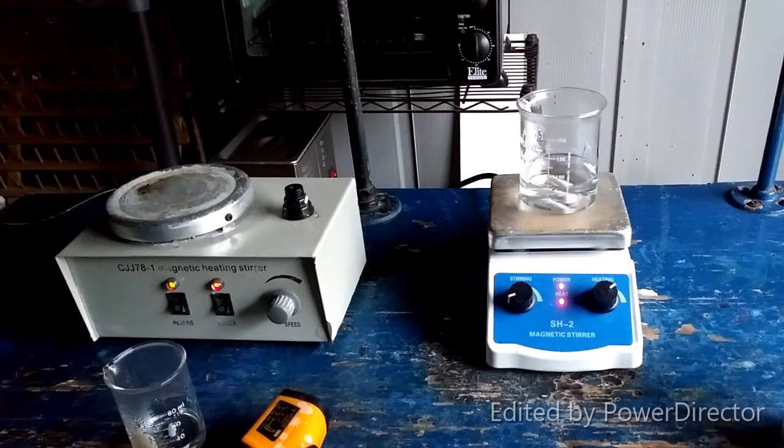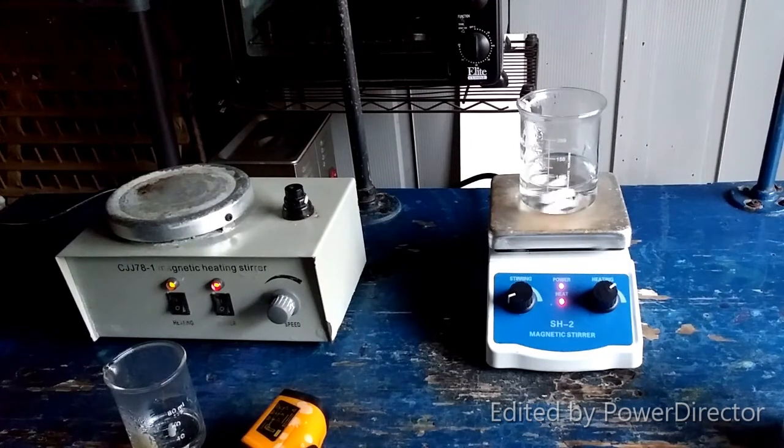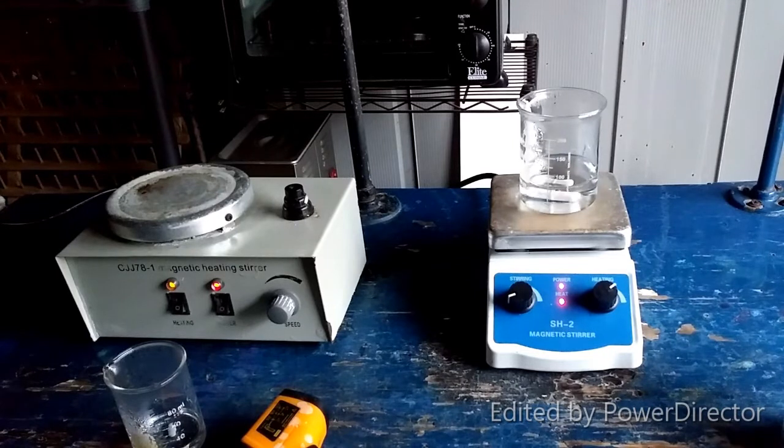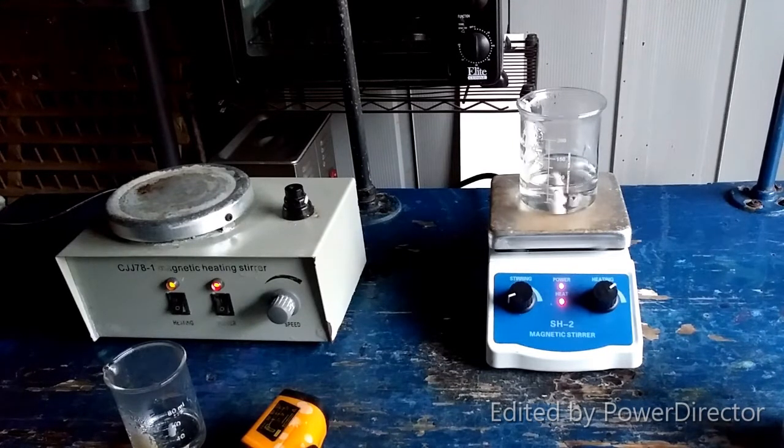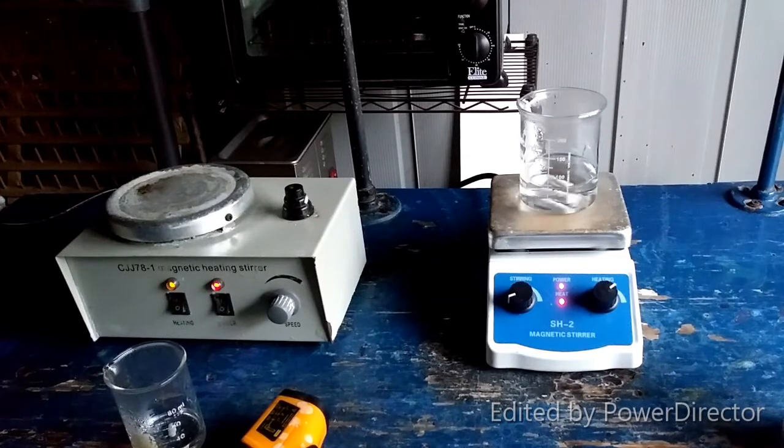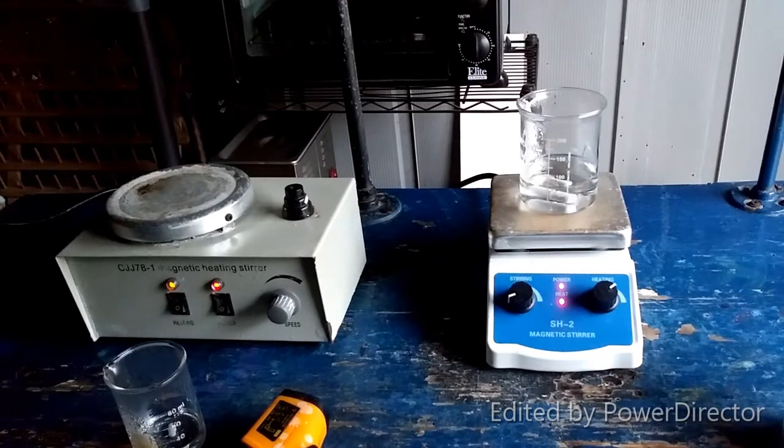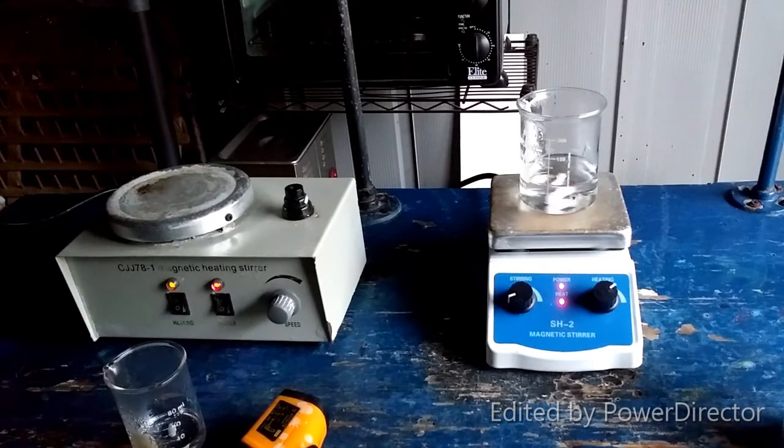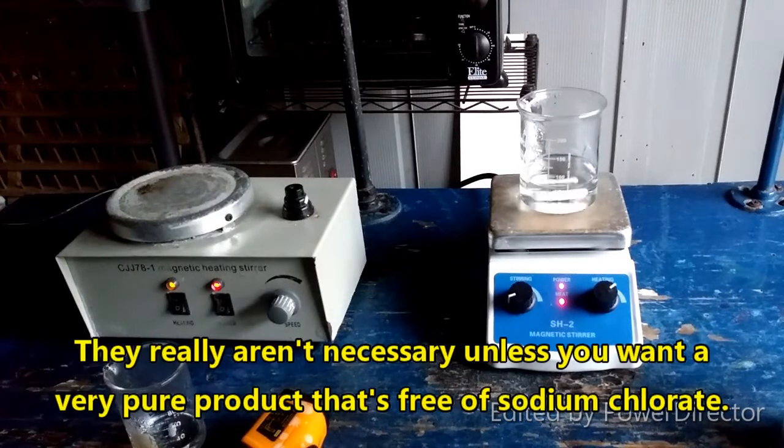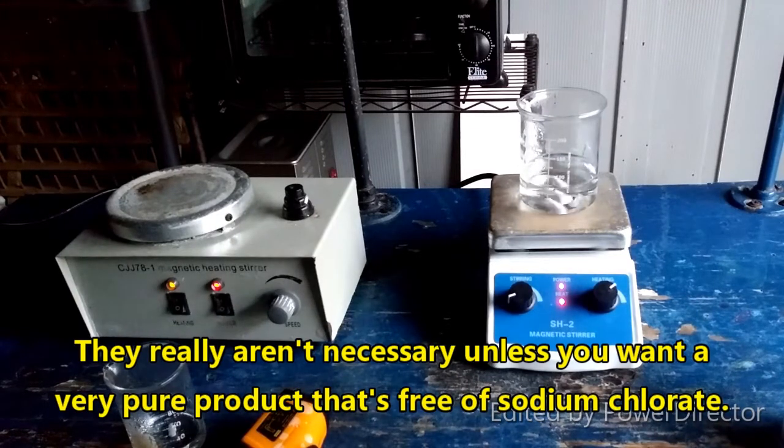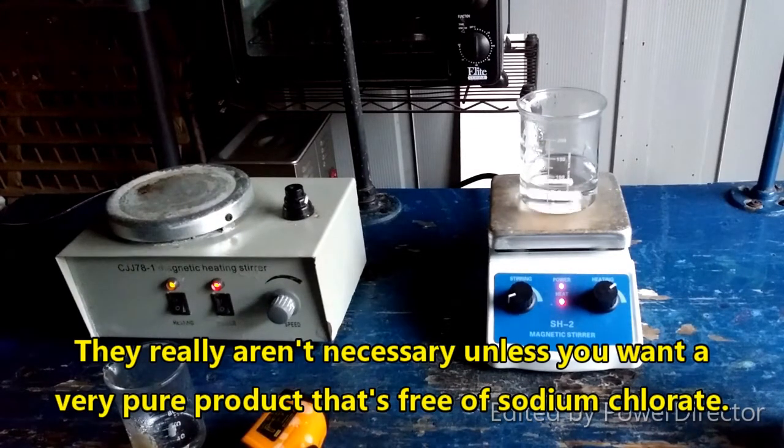Hello everybody and welcome back to the Poor Man's Chemist. In this video we are going to be making silver chlorate from silver nitrate. This is extremely simple, and I'm not going to show you all the recrystallization steps since they are straightforward. I will give you a link to where you can find this protocol written out in detail on my website.